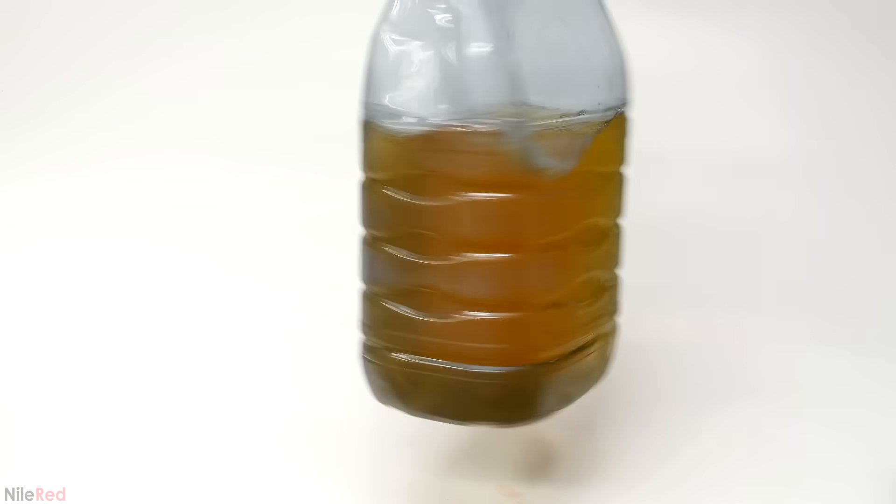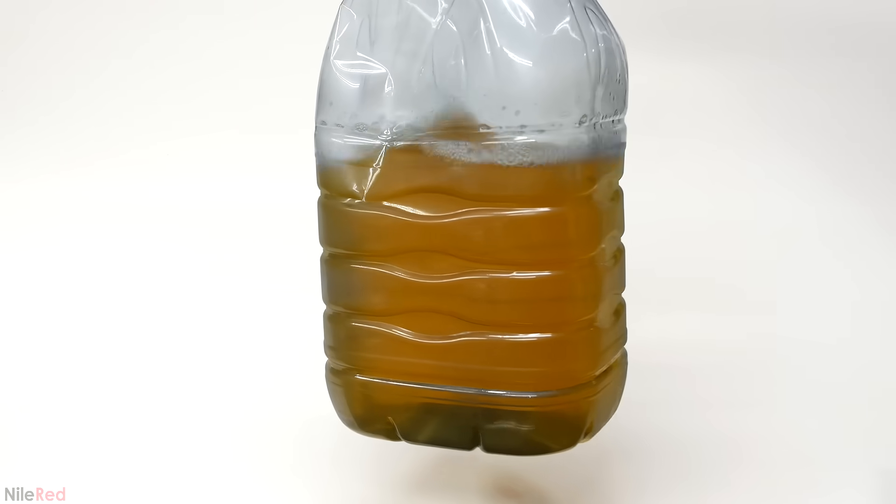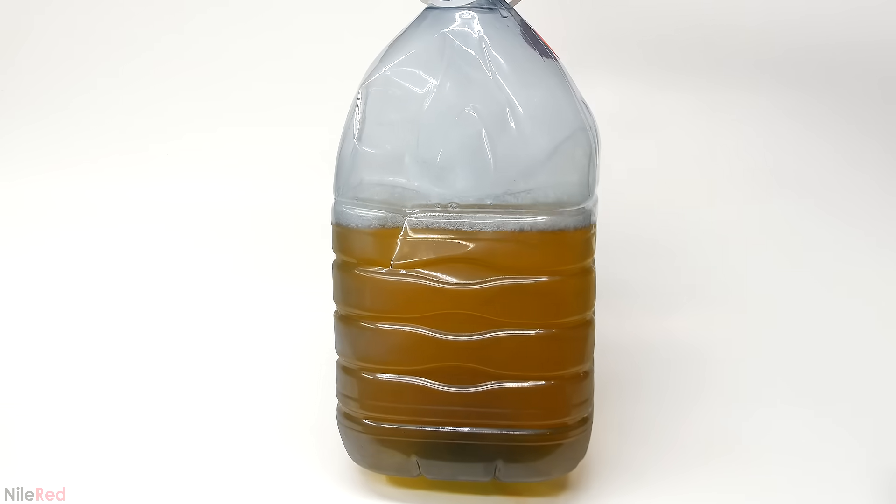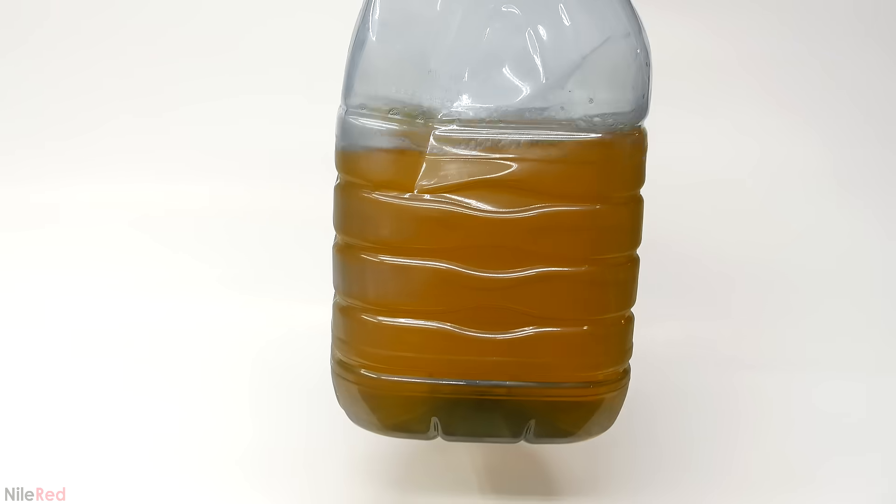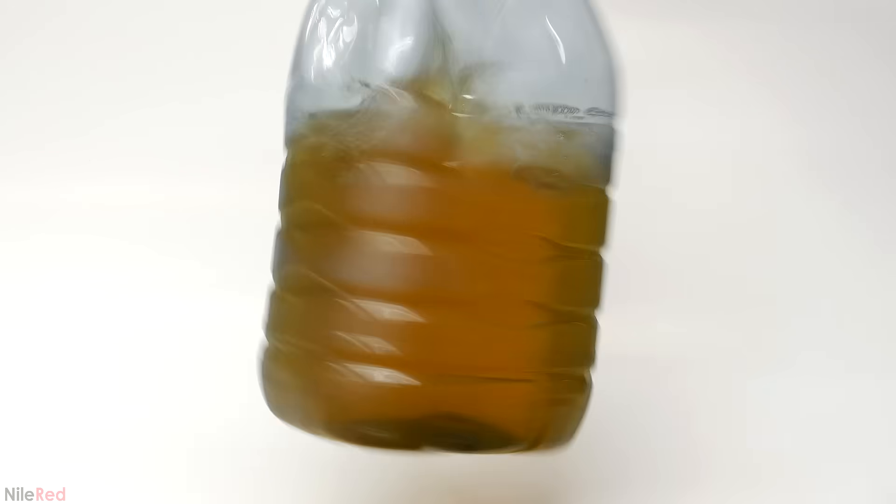Most of it's just water, though, which I'll need to get rid of before trying to isolate the urea. Unfortunately, the best way to do this is by evaporation, which is really stinky.